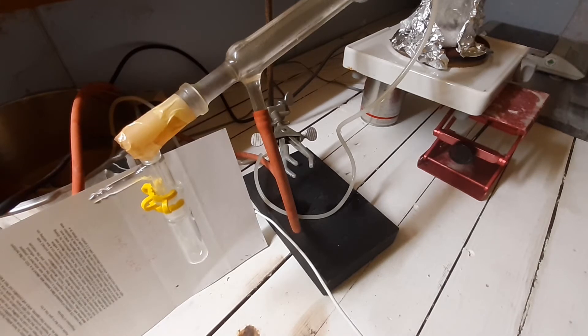I used a cheap standard hot plate. These things are rated at I think 3,500 watts—just raw power—since I don't need any stirring. On the left you can see the collector.